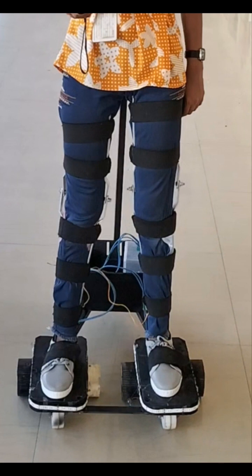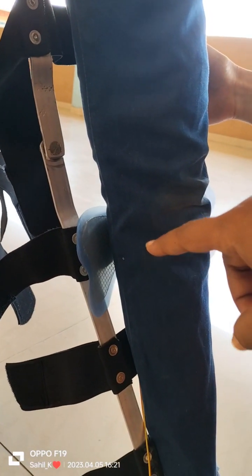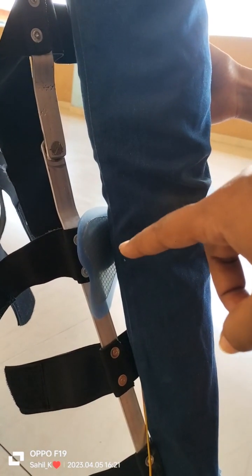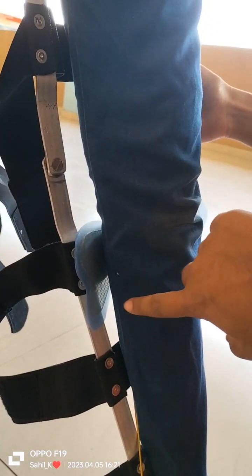This product is a multi-featured product which has a flexible handle support. These are the butterfly electronic remote control patches which provide acupressure stimulation to the dead cells of the paralyzed person's leg.